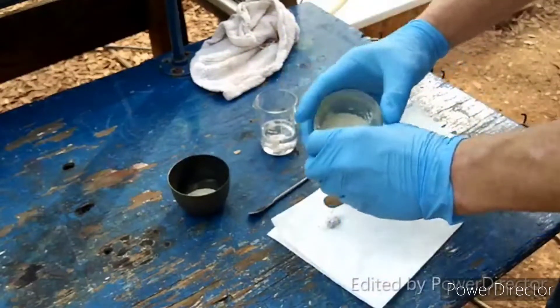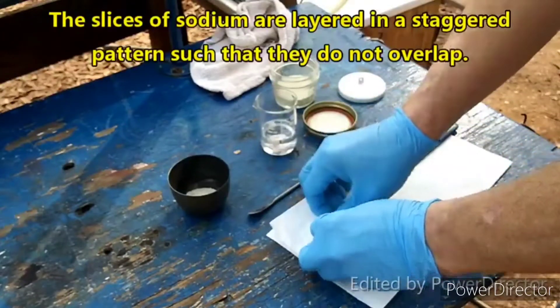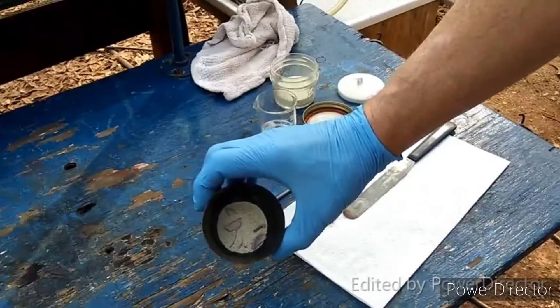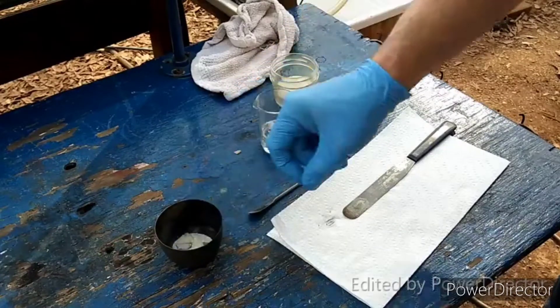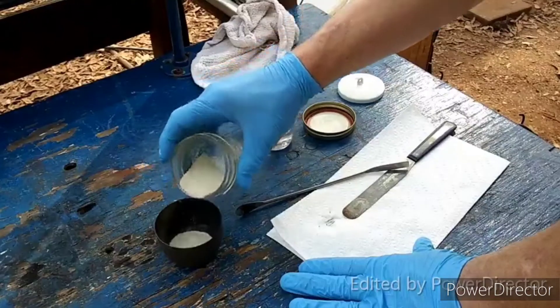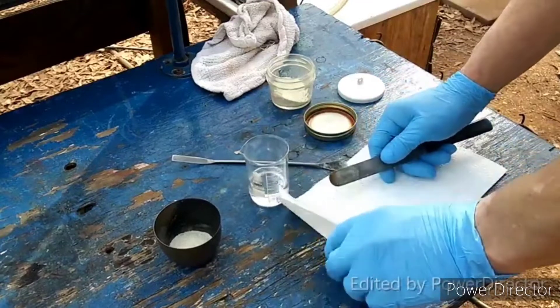We've got some sodium in there, so we're going to put a little bit more ferrocyanide on top of that, then cut some more sodium. I am placing them so that they're not overlapping — or at least they weren't overlapping until I held it up and tipped it around. Ken Blair says to spread it around evenly so that you have it fairly well spread out, so I am just going to continue working on doing that.